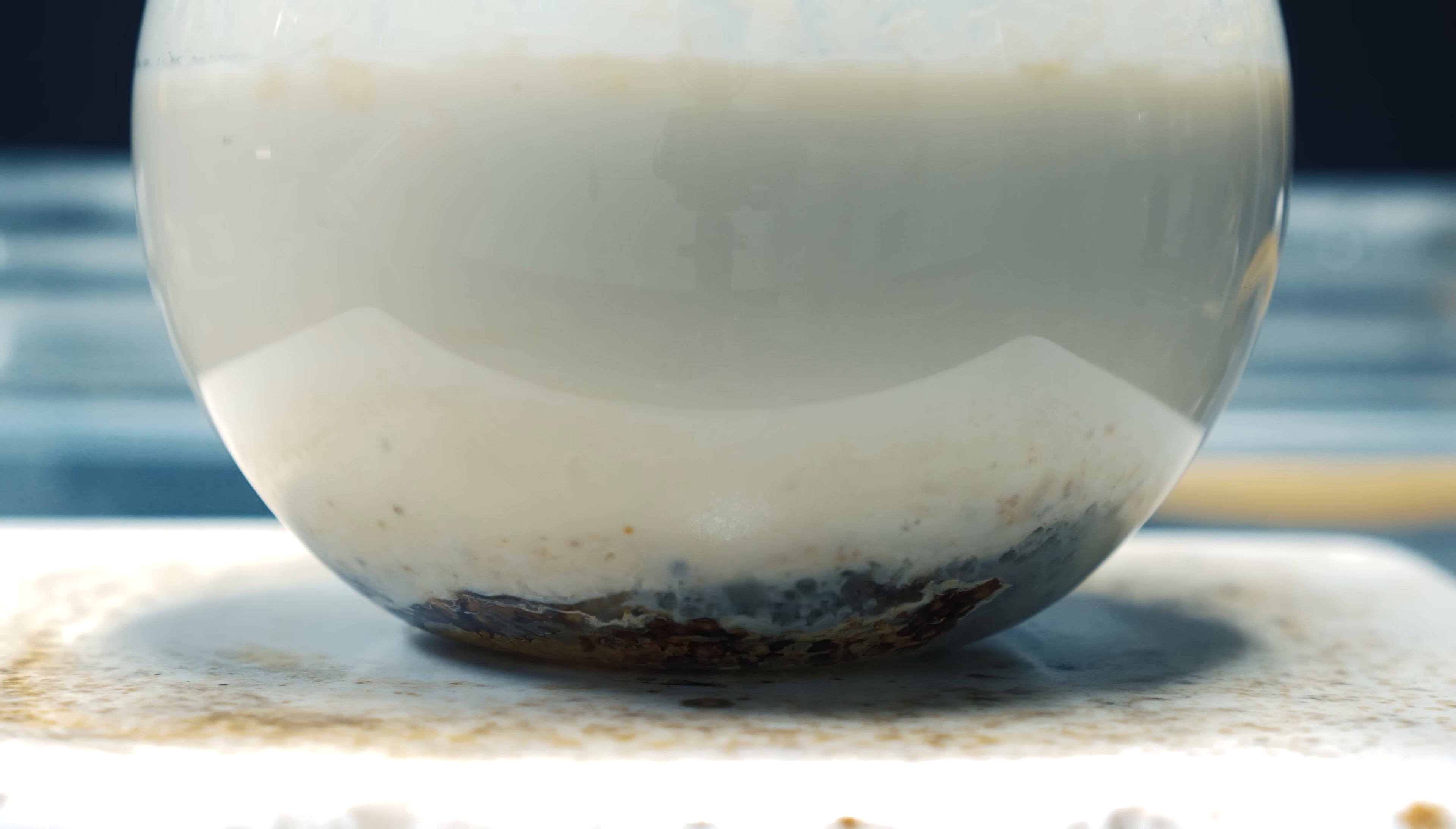After a while, I looked down and the sodium hydroxide was reacting with the leftover tin. I was hoping this didn't affect anything in the entire process. So if my yield is low, then I blame it on this.